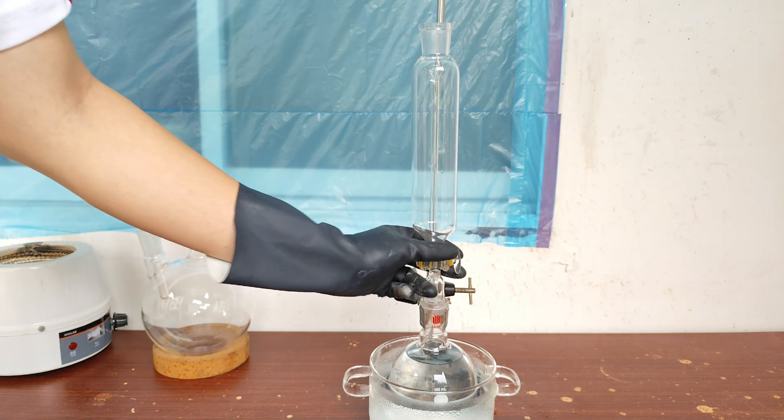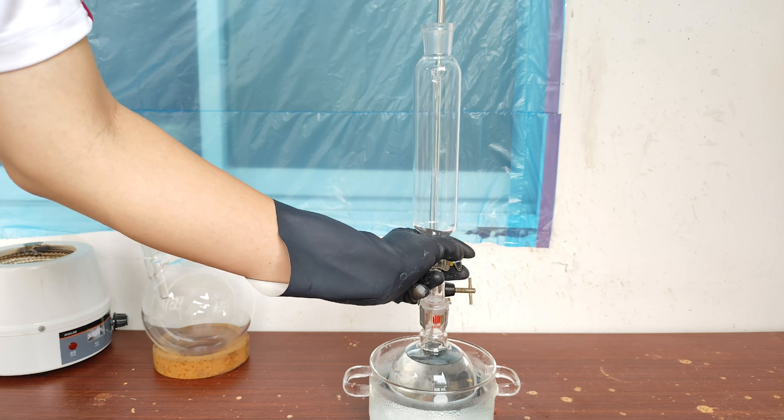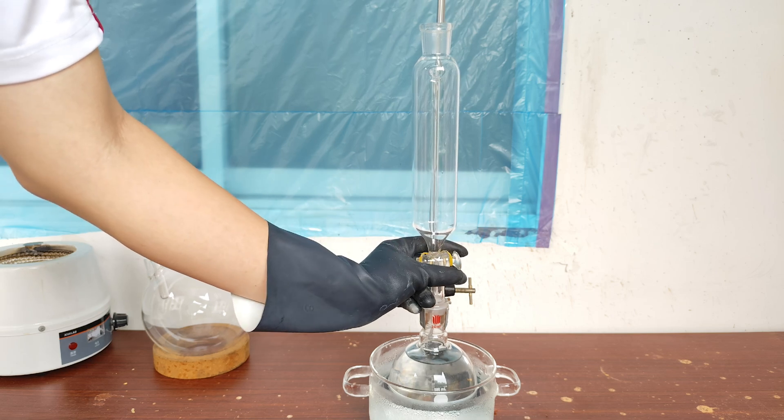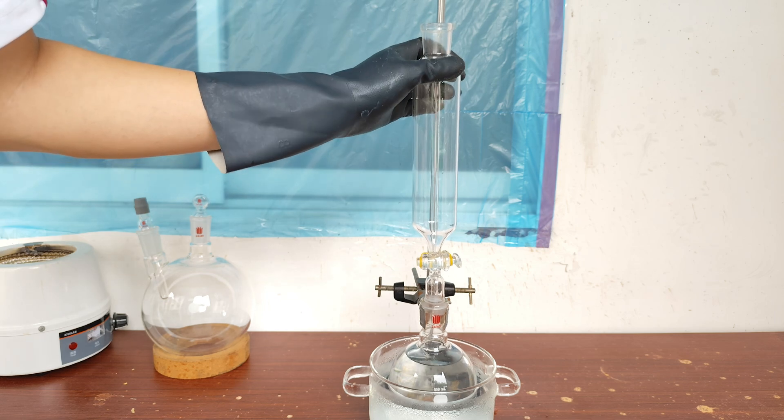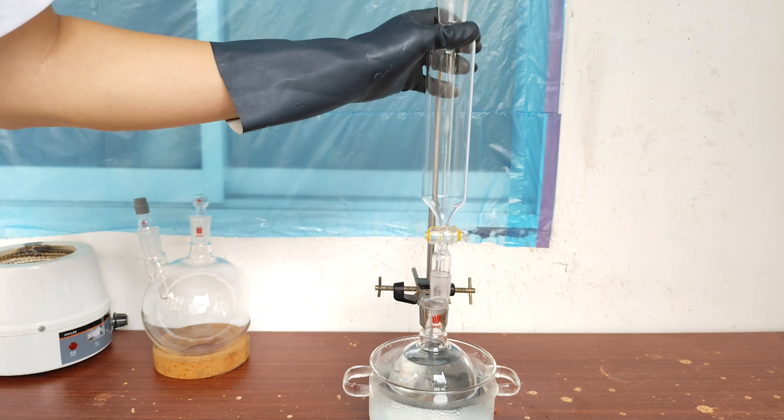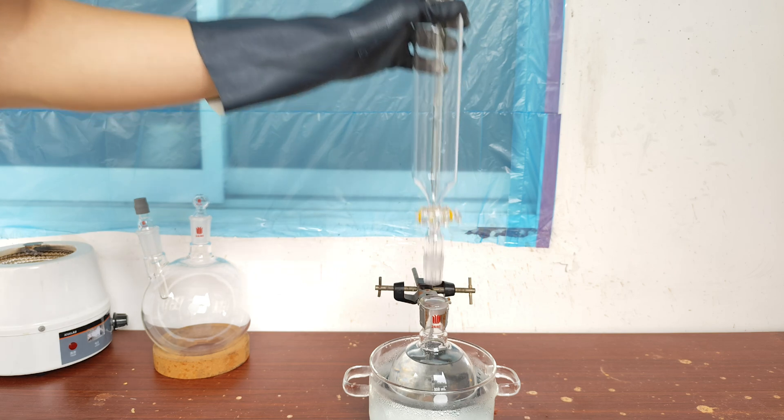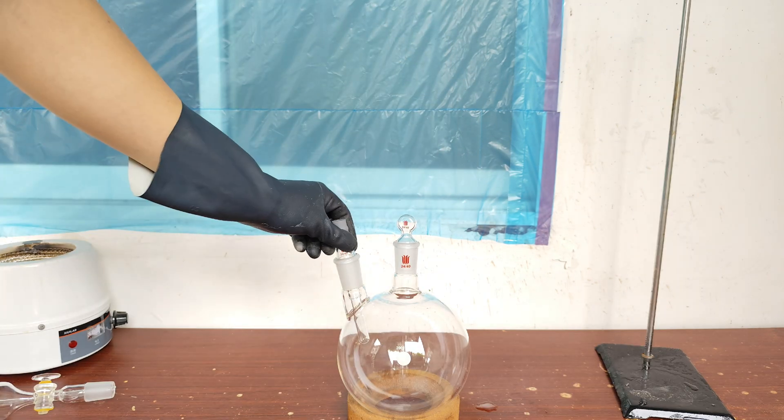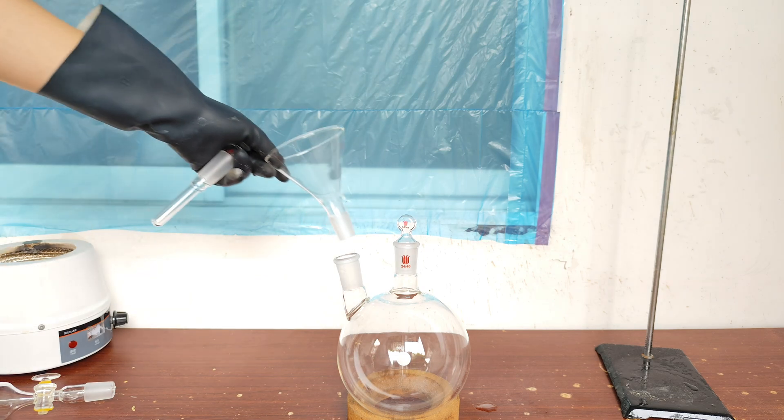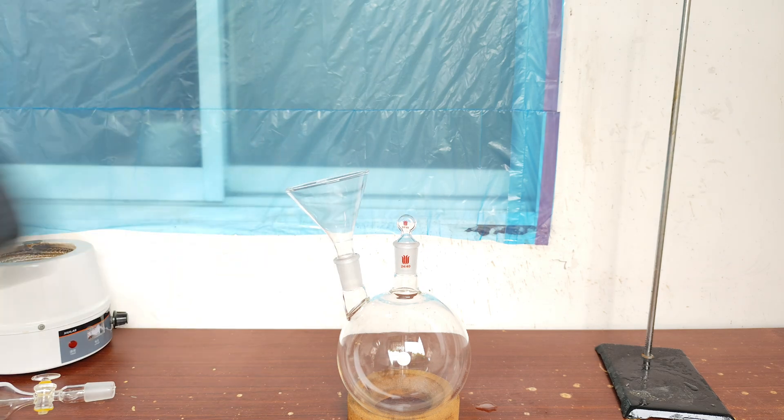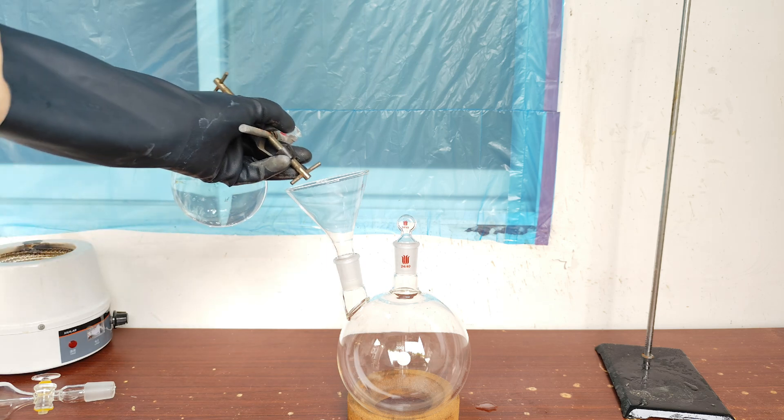After a few minutes, the dropping is over, so I turn off the stopcock and take away the dropping funnel. When the mixture is down to room temperature, I pour all of them into a bigger flask.